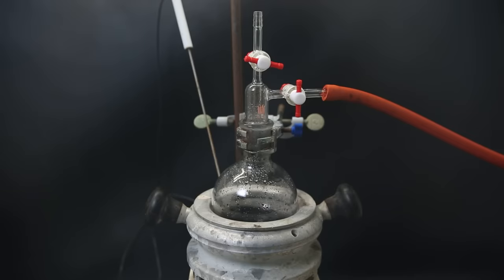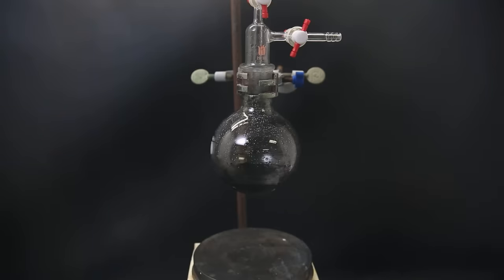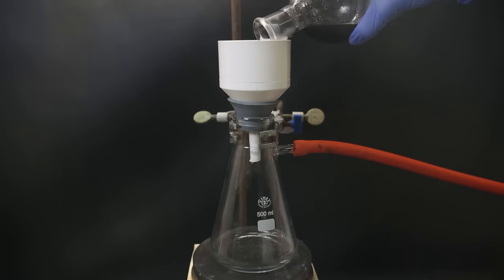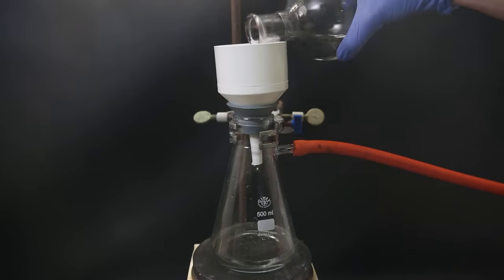In the end, the reaction consumed about one balloon full of hydrogen. I then repeat the same process as before with a nitrogen balloon to remove all the hydrogen so that the catalyst won't spontaneously ignite. Then set it up for filtration through three stacked filter papers to make sure it filters out all of the carbon particles. At first the filtrate is clear, but the product and impurities are sticking to the carbon.